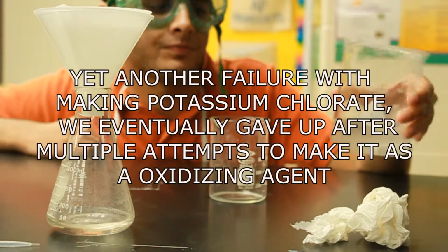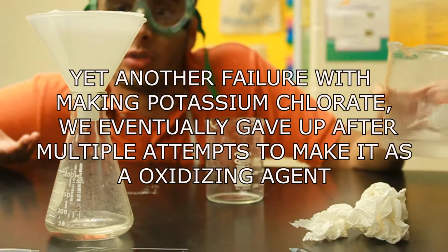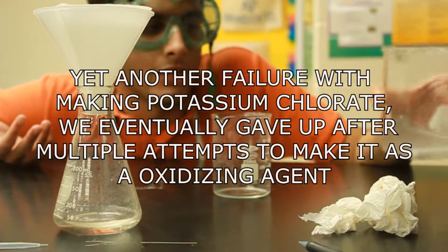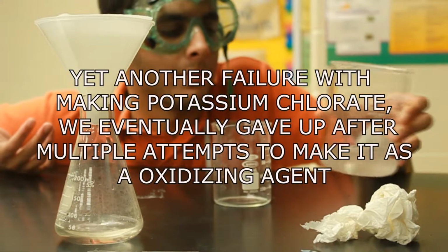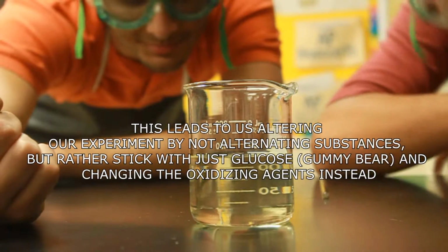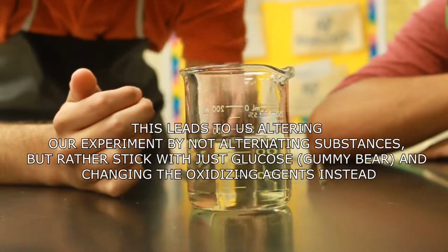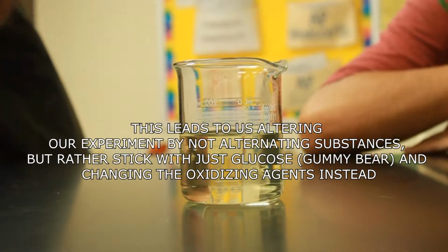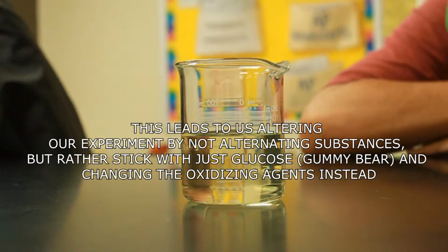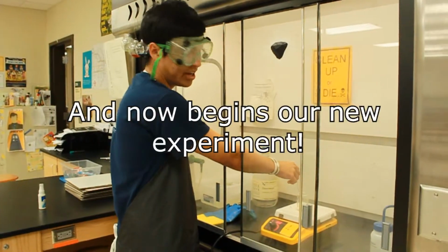I just mixed everything together because it's not working. So let's just mix everything together and see what happens. If it doesn't work, I'm gonna cry. We have to stir. Nothing happened.